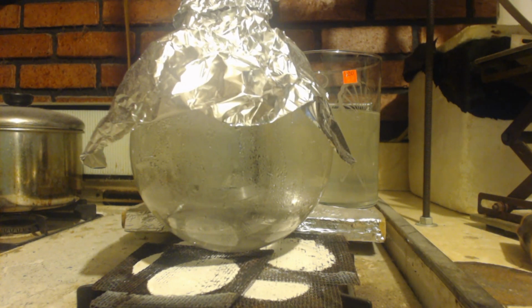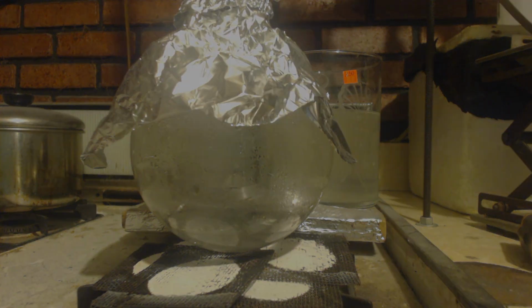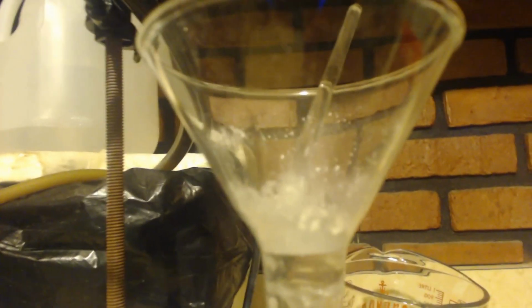The thing is, I don't know how water or ethanol affects that reaction to make the nitroethane. So we'll see. Keep in mind, I've never done this experiment before, and from this point on, I'm really guessing about this ethanol crystallization and how to get rid of it.